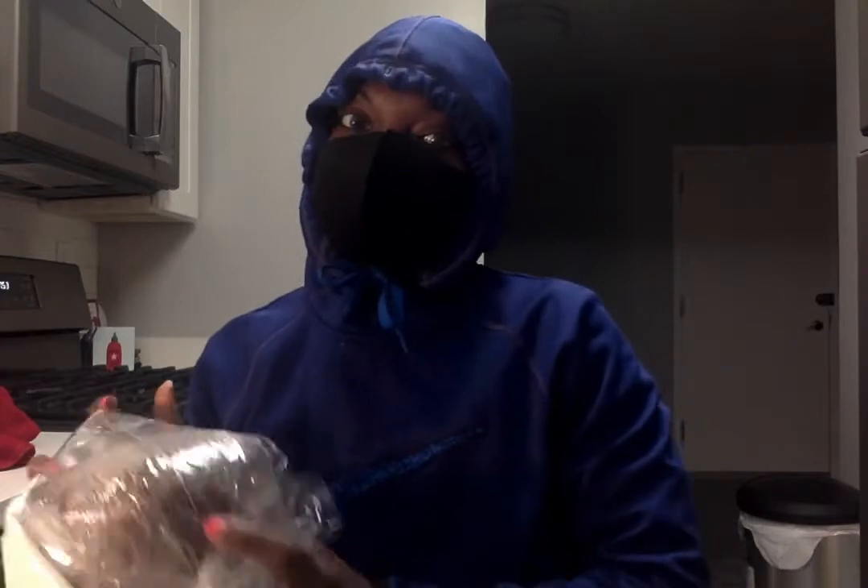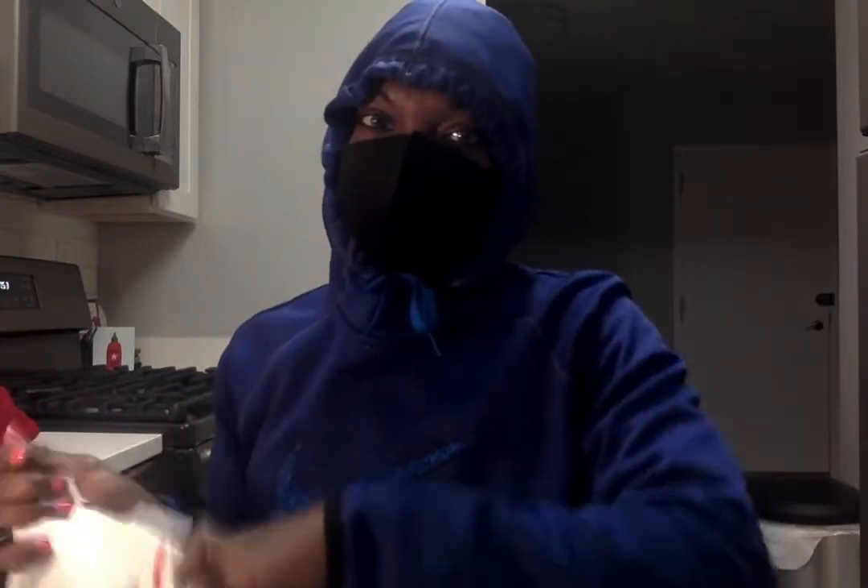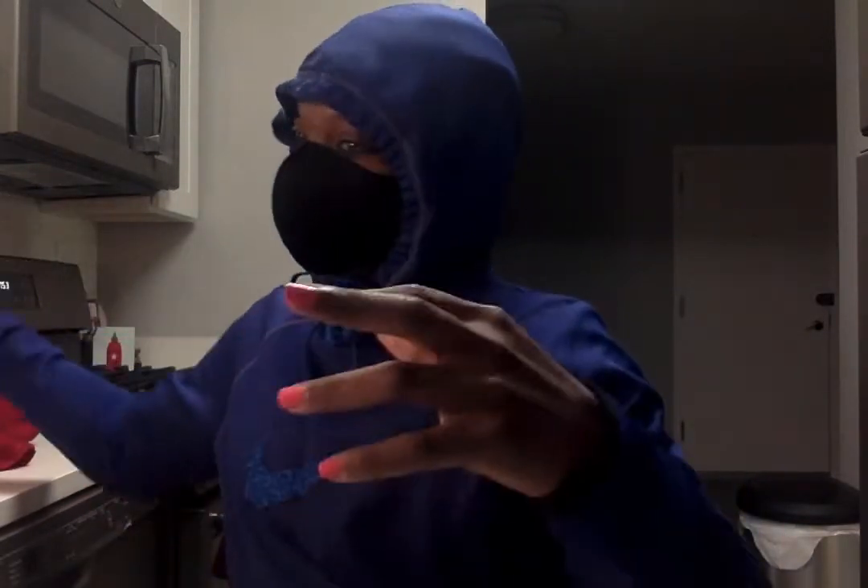When you do this you need to have really, really clean hands. I don't have any gloves, but I did just finish washing my hands with dish soap for about a minute, so that should be good enough.